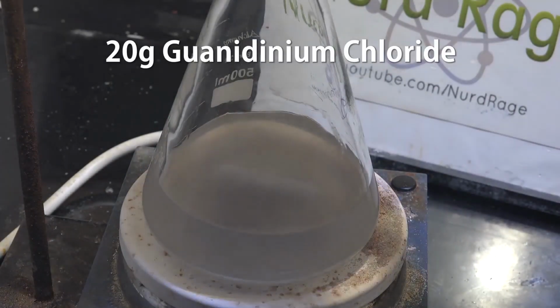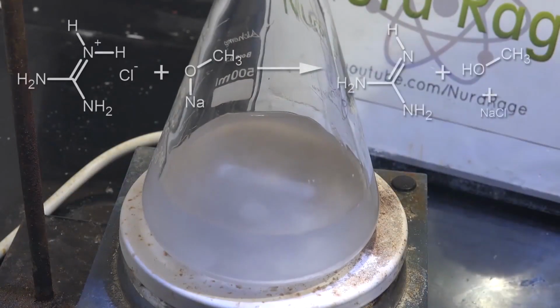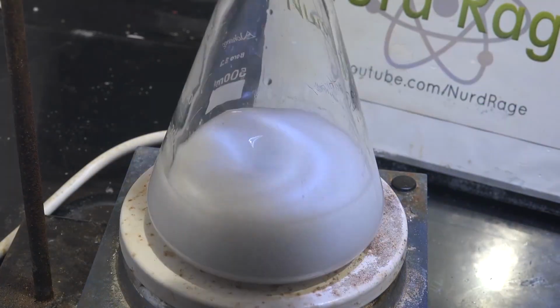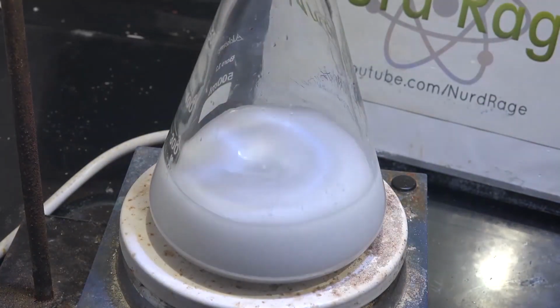Now add in 20 grams of guanidinium chloride. We're reacting the sodium methoxide with guanidinium chloride to make guanidine and sodium chloride. Anyway, now that we have produced guanidine in solution, we have now cleared the last precursor step.